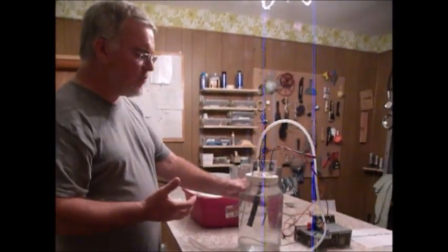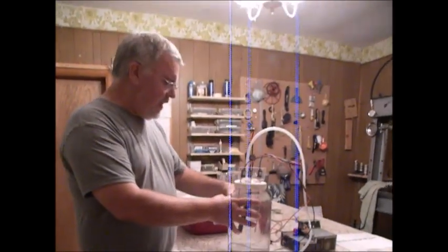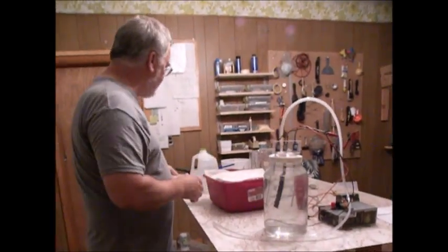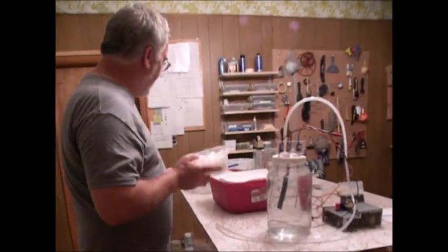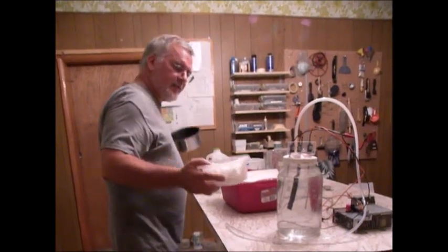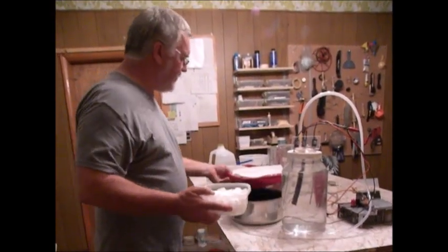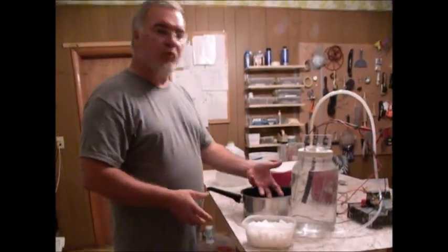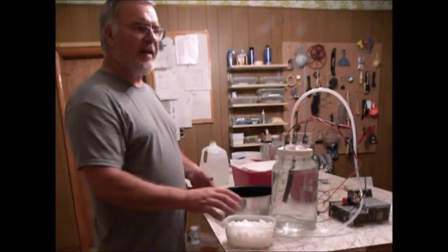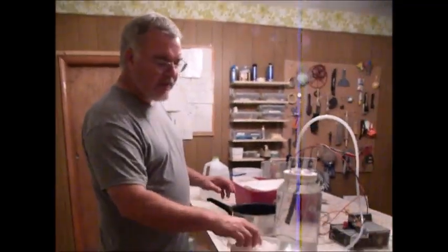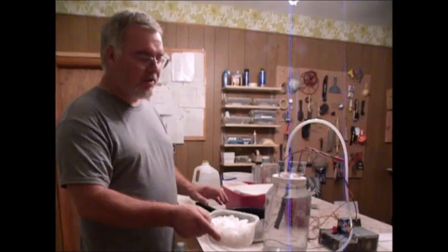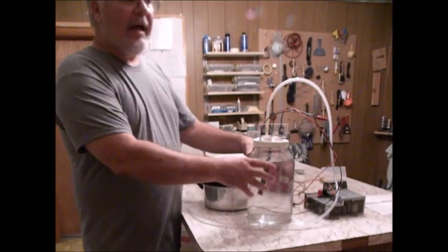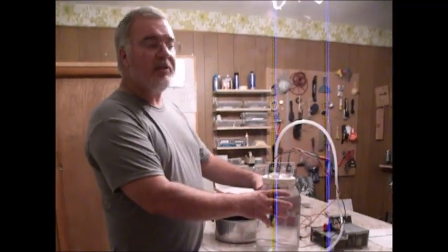Going back into recharging - the cell is going to use the chloride that we're putting in here, and I'll give you a little bit of math. This is about all I'm going to give you - you can research this on your own. But we have to get the chloride in solution. What I would do is I would fill my pan up, pour this in here, and bring it to a boil and it will dissolve it. It's going to take a while, five to ten minutes. If you have the time and patience and you want to break it up, it's going to dissolve much quicker.